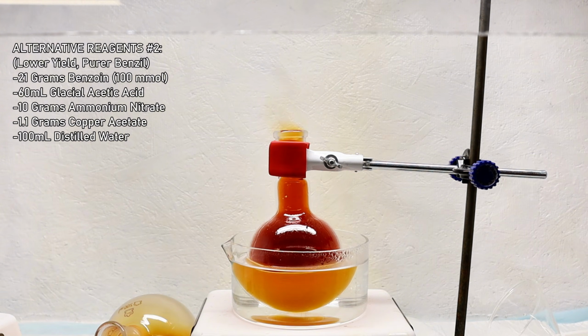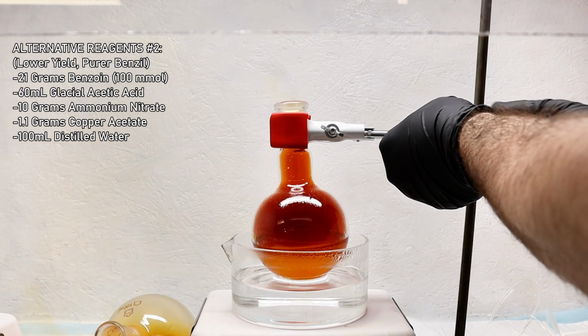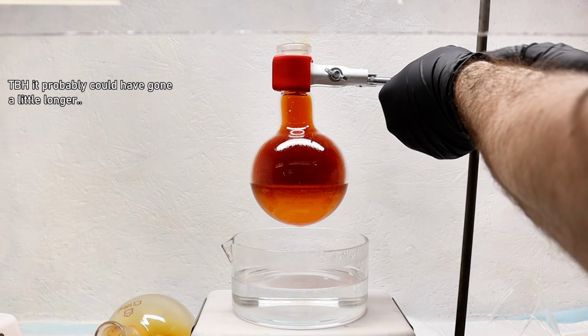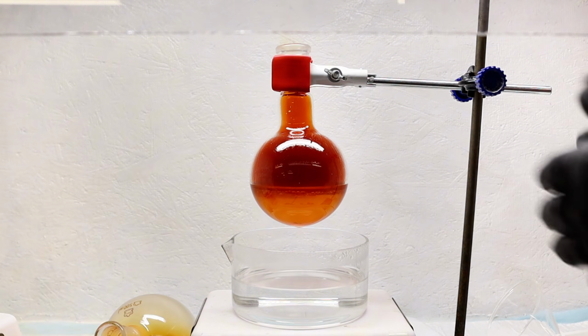If you choose to go this route using the same 21 gram mass of benzoin I used here, you'll simply need to add 60 milliliters of glacial acetic acid and 10 grams of ammonium nitrate to a boiling flask along with the benzoin. You'd then simply dissolve 1.1 grams of copper acetate in 100 milliliters of water, add that to the mixture, and then heat to a reflux for 2 hours. Anyway, looking back at my reaction here, I went ahead and continued the heating until no more NO2 gas was produced, at which point I cut the heat and the stirring.